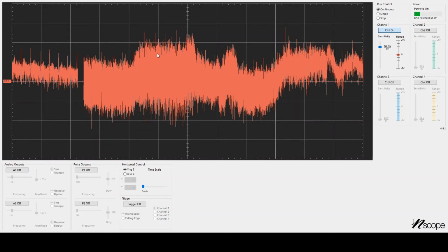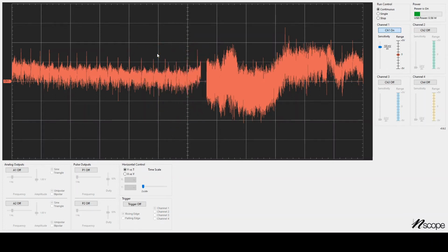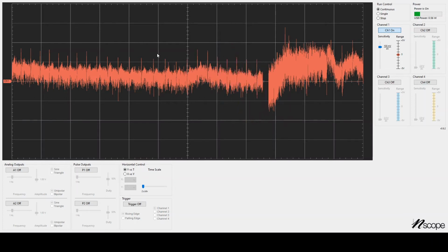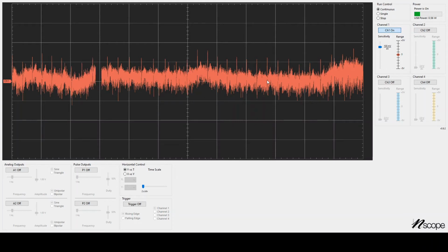So now I've unplugged the charger from my laptop. Now we can see it's still kind of fuzzy, so there's still some 60 hertz in there, but I see a much stronger peak once per second. So this is a good indication my circuit's working. It's not hitting plus and minus 5 volts because I'm grounded. I can see a peak, and I can almost see the PQRST in there under the noise, but we'll add filters later to amplify it better. Just make sure you're not plugged into your charger while you're doing this.